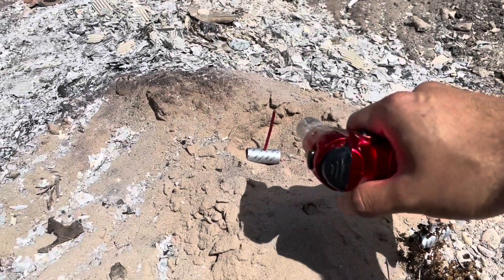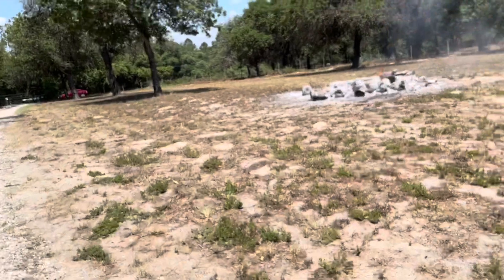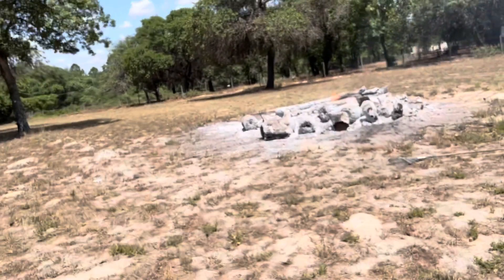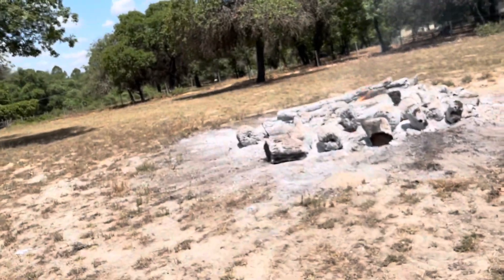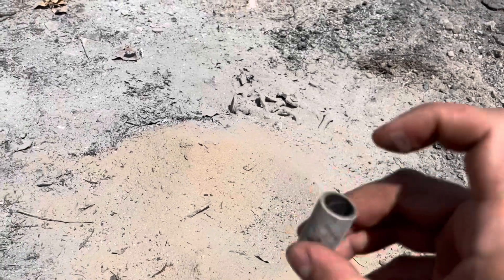I want to say they're a gram and a half each. Well, you saw that. I try not to make too much noise out here because it's loud, but you can see that huge flash and then the sound, obviously. So even with them both being the same, this guy just popped out, and the other flash cracker pretty much disappeared.